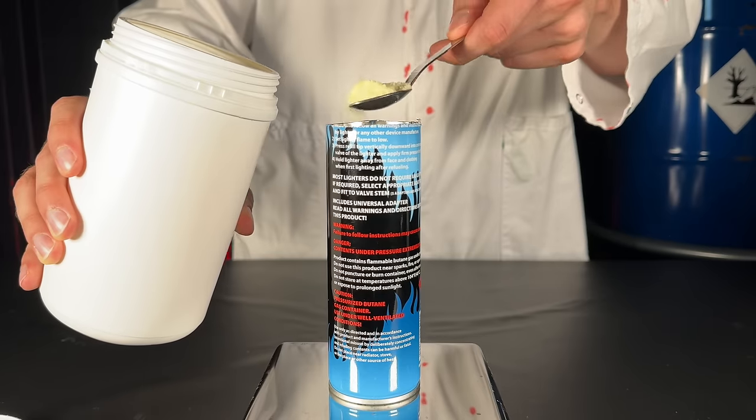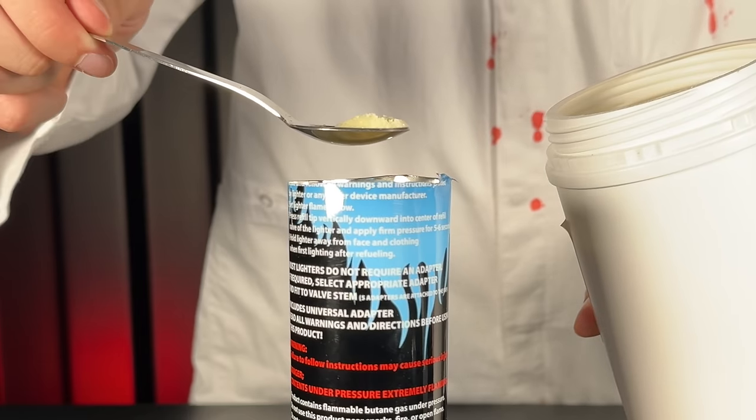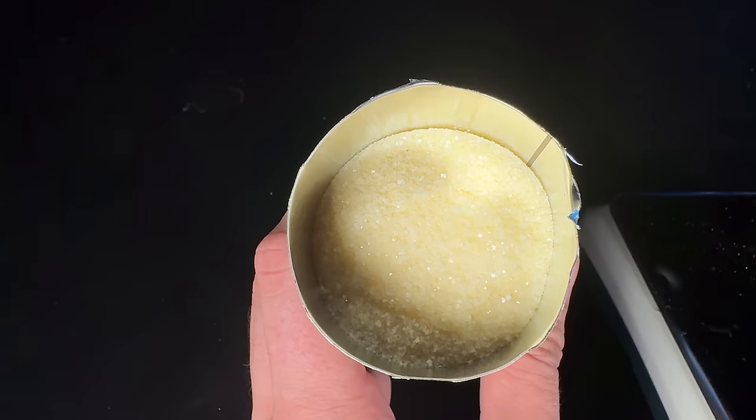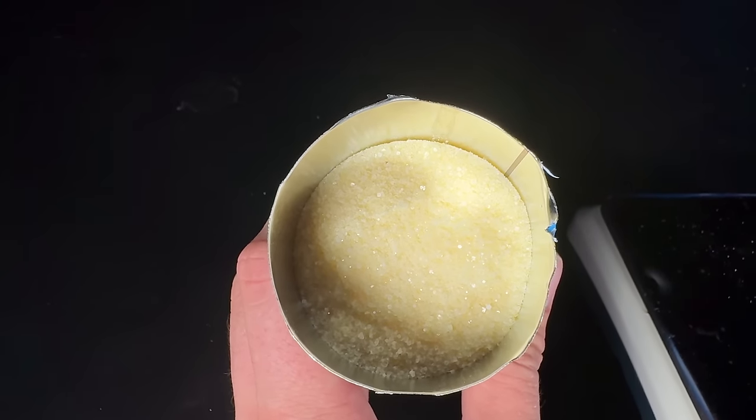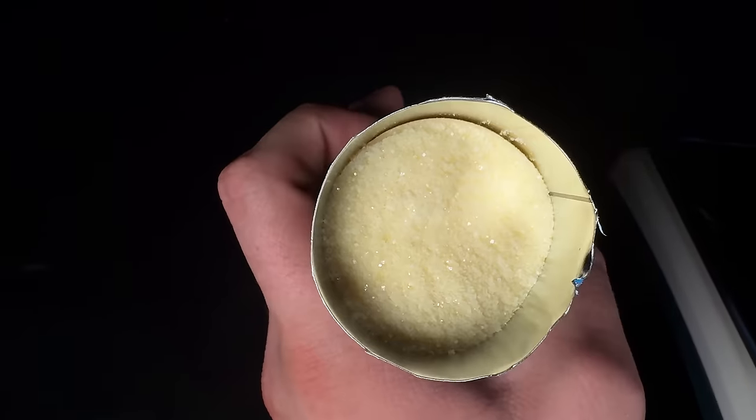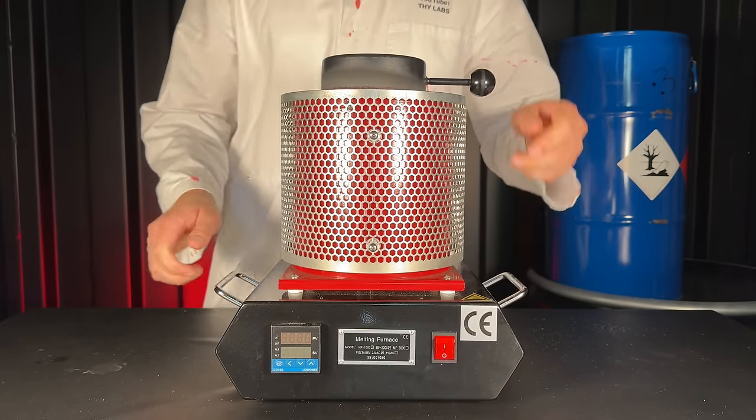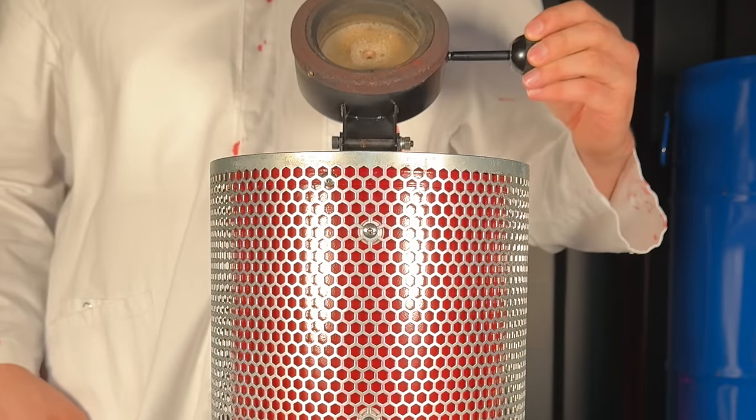I found that the best type of container for this reaction is a butane bottle made from iron. The container is going to get destroyed during the process, and to me it is therefore important that besides being chemically resistant, it is cheap. I weighed out 250 grams of potassium ferrocyanide trihydrate, which should be more than enough.